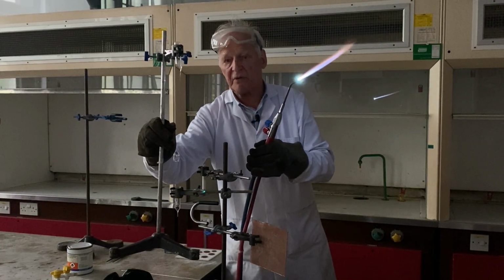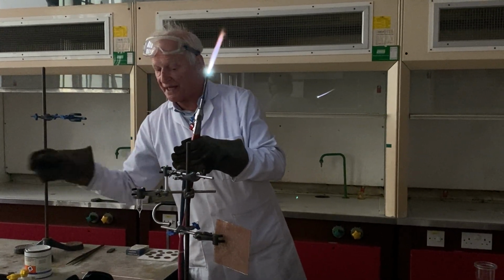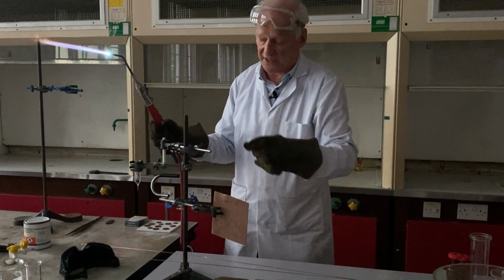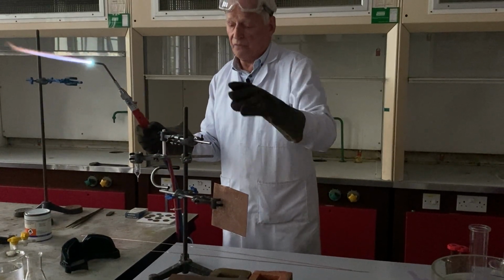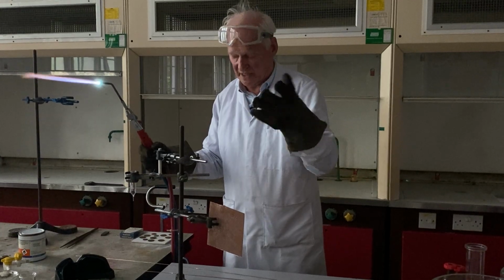So these experiments are not easy, they require a lot of practice, and as you see, I didn't quite get it, but I certainly showed you the effect there of a high temperature on a heat-proof glass test tube, up to a certain level heat-proof.